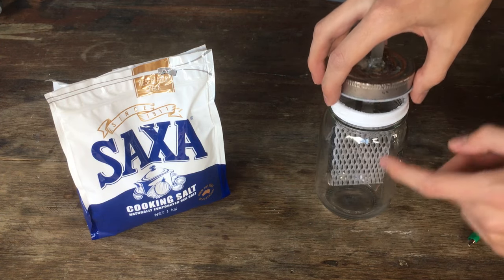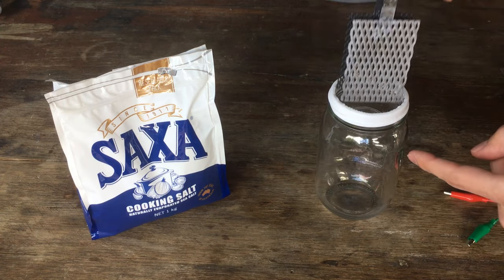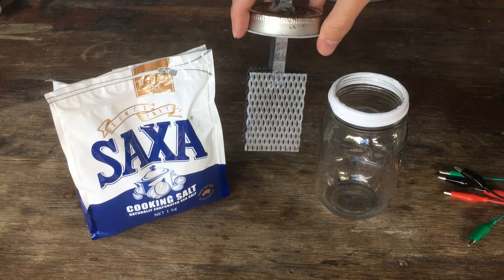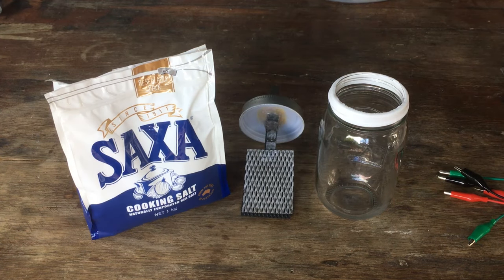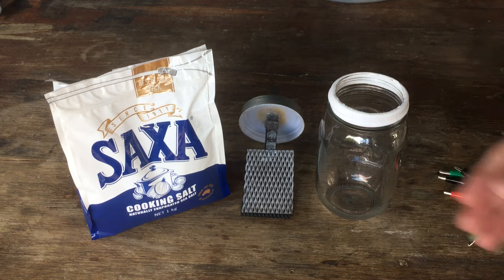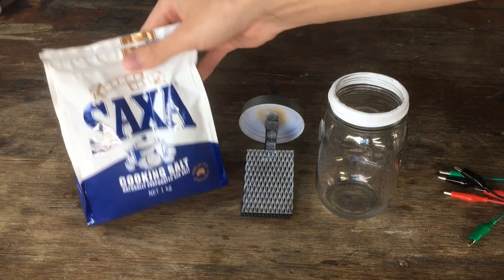That will be sealed, and we can electrolyze our solution of sodium chloride to convert it into sodium chlorate. For our starting material of sodium chloride, this is obviously very easy to get pretty much anywhere. It's just table salt.